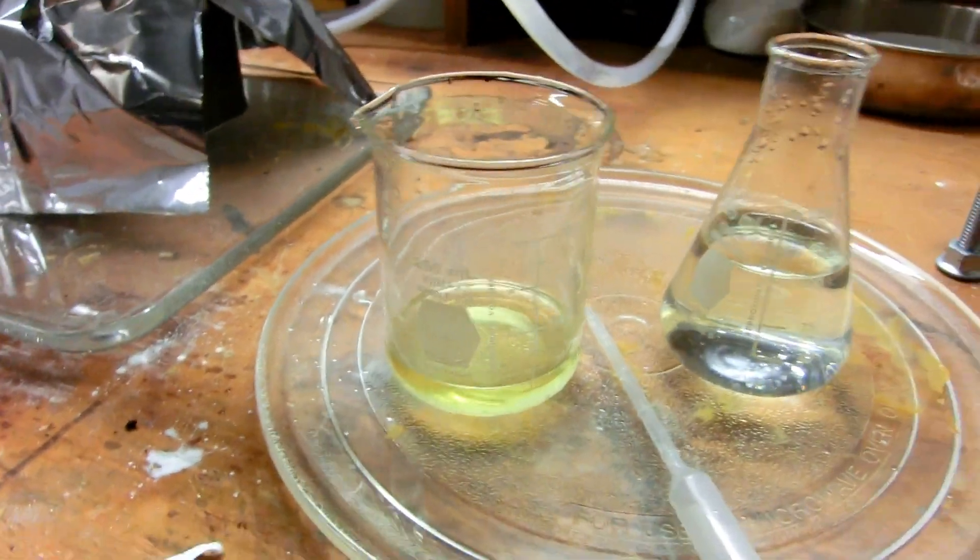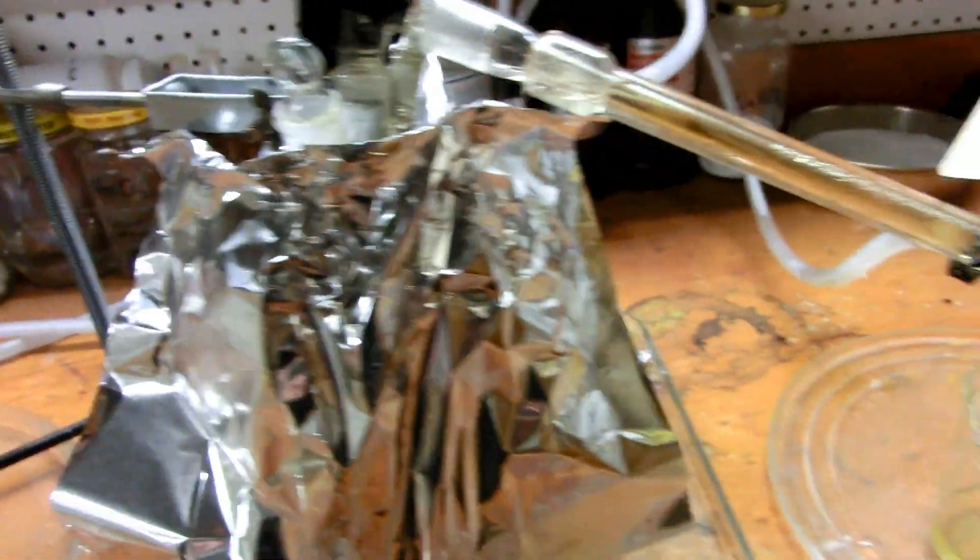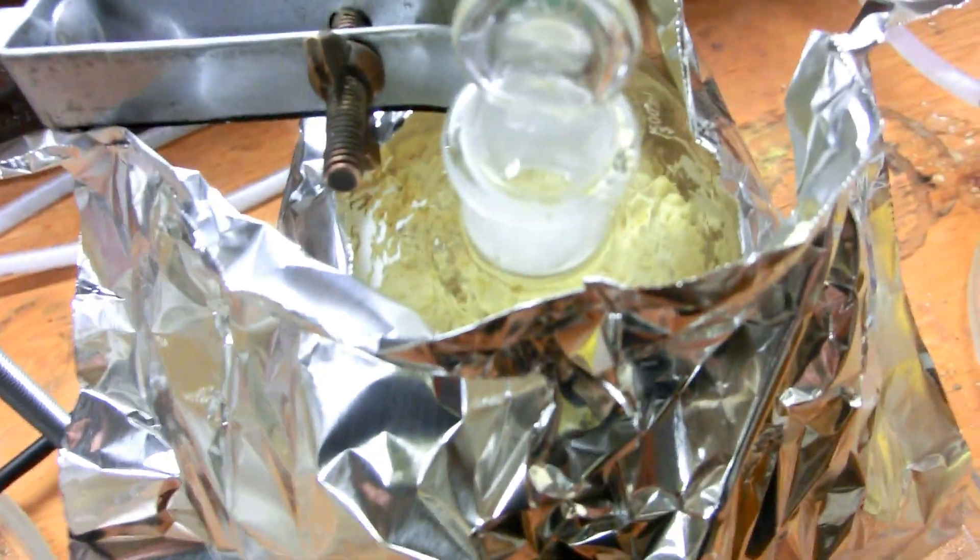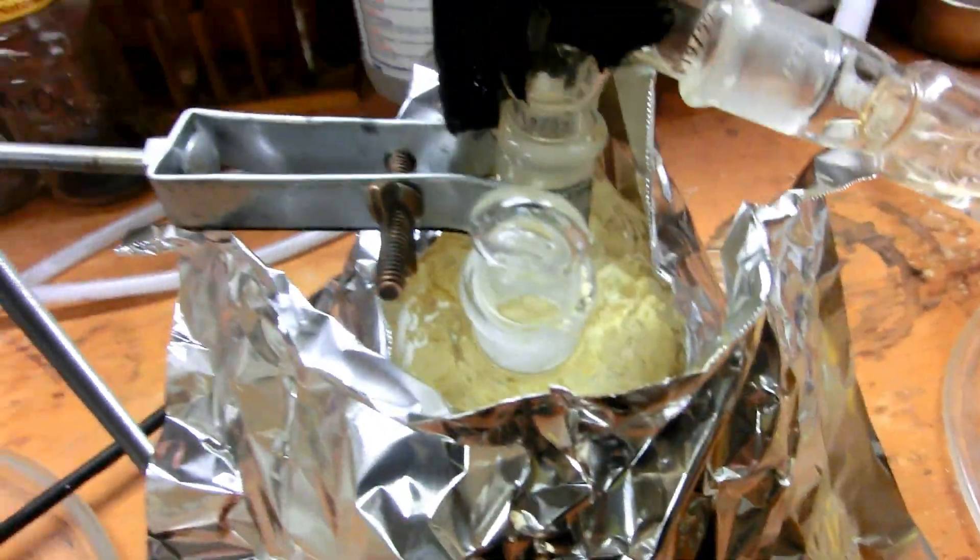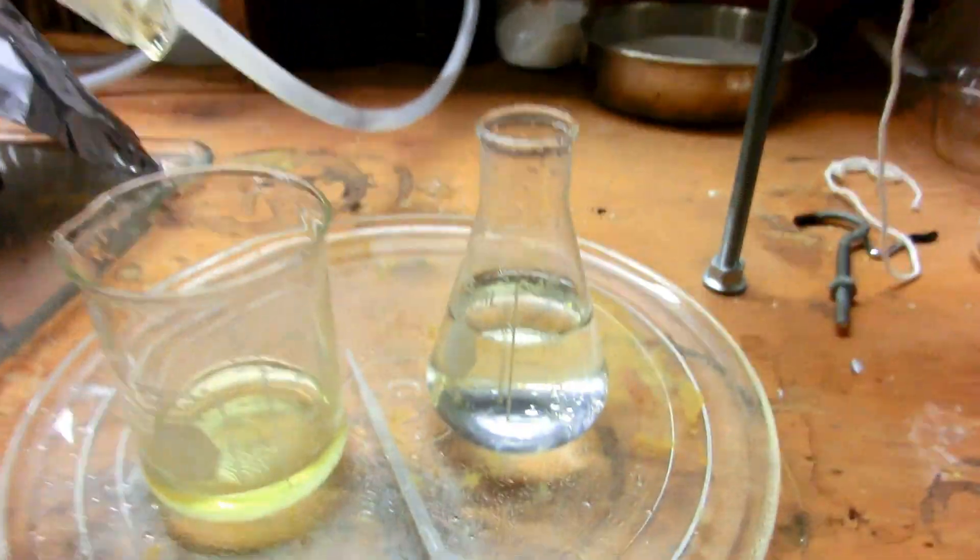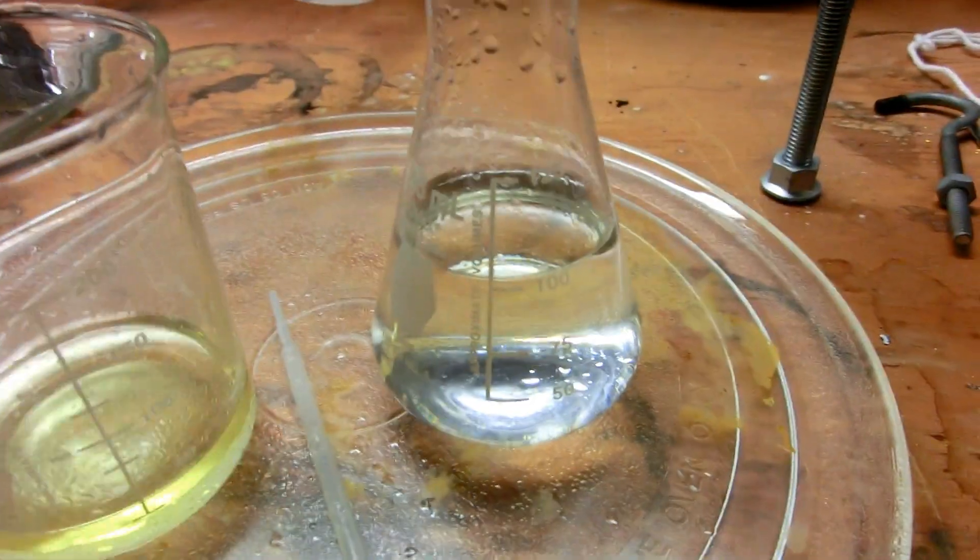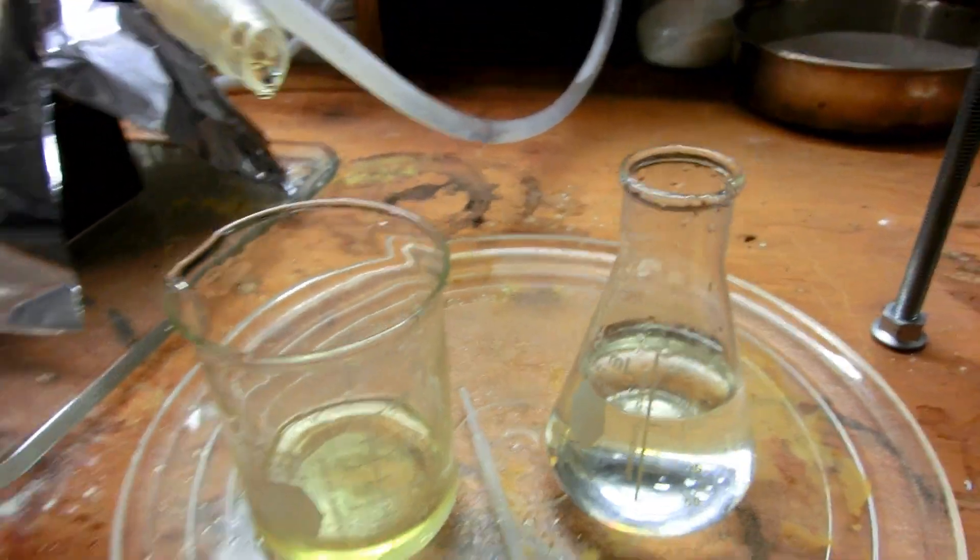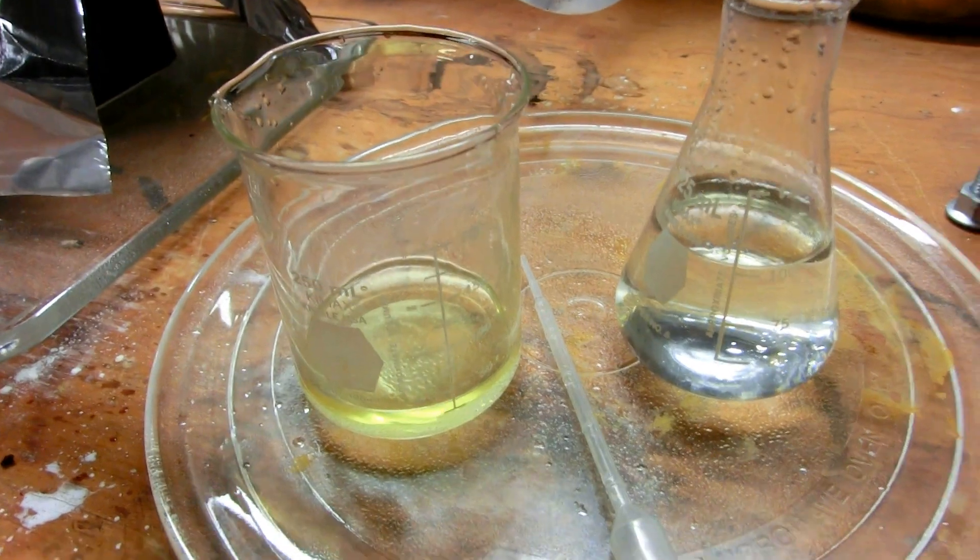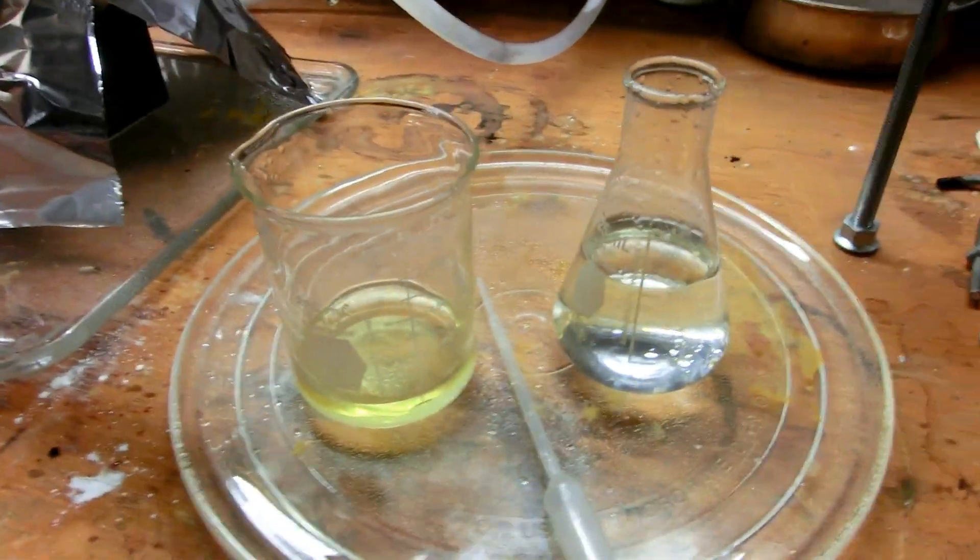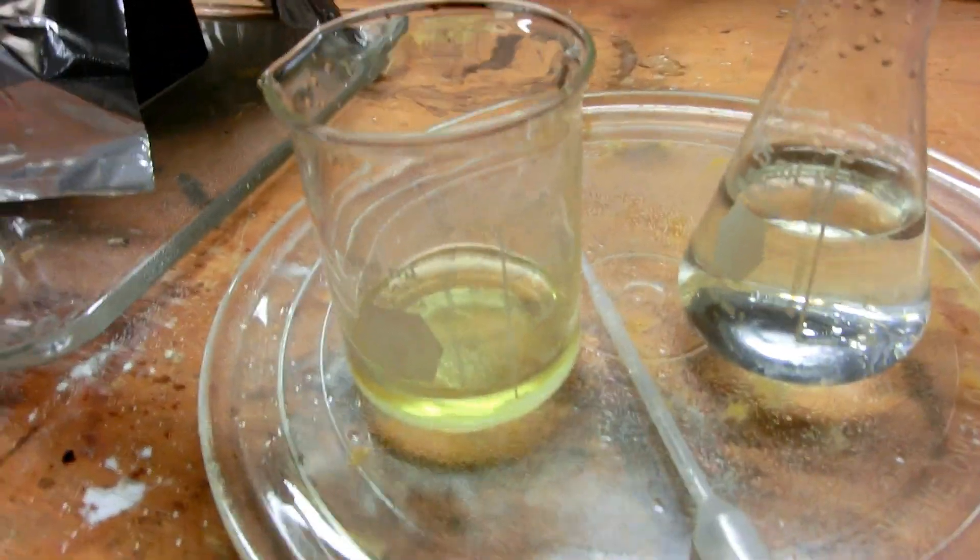Okay, so I'm back. Unfortunately I have to announce that I made the mistake of leaving this unattended for too long with the foil on it and ended up getting it a little too hot. So I did get some decomposition of the nitric acid, but as you can see, it's boiling out at exactly 121 degrees Celsius. I didn't have any bumping issues. It's just sort of turning into a solid chunk of calcium sulfate and ammonium sulfate. I over collected the pre-product that has a lot of water in it. So I'm unfortunately going to have to end up combining these two and redistilling to the 68% azeotrope. If you watch your synthesis more than I did, you will definitely get a better product.